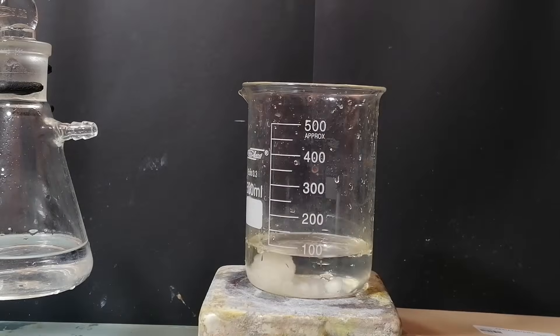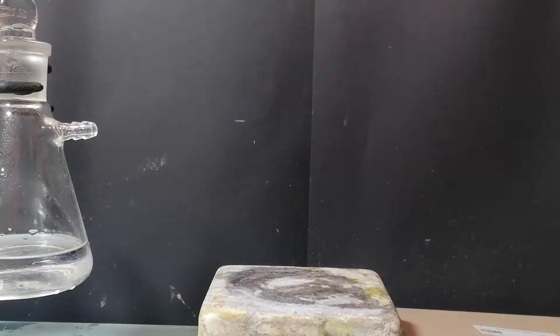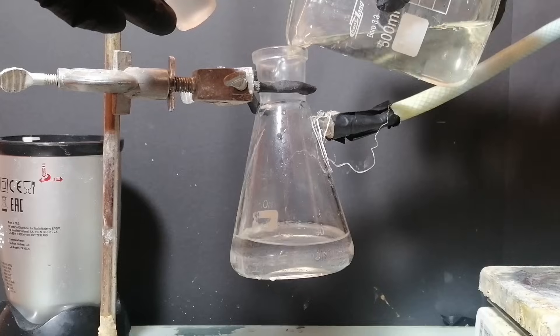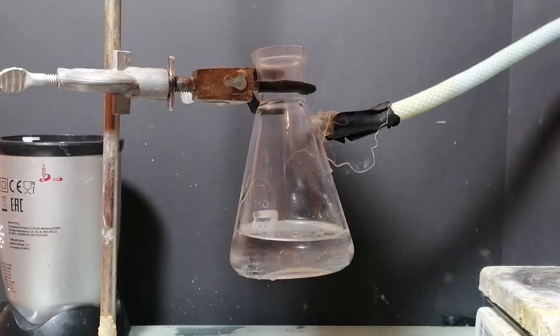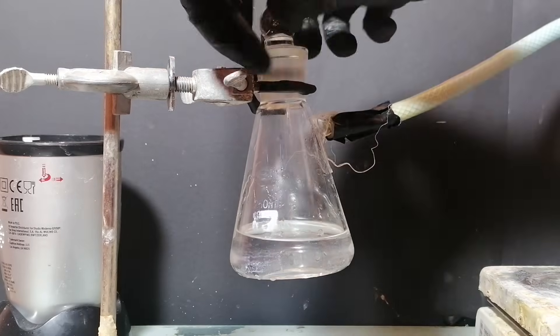To another beaker, I've started adding a bunch of sodium nitrite. After stirring it, it's time to combine the two. So to start, I've added some of the nitrite solution and quickly stoppered it off.